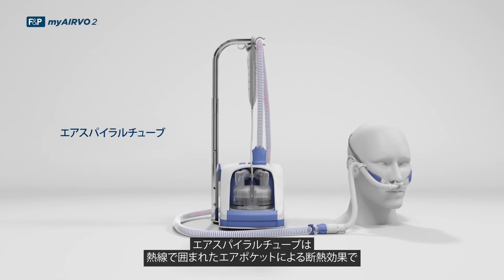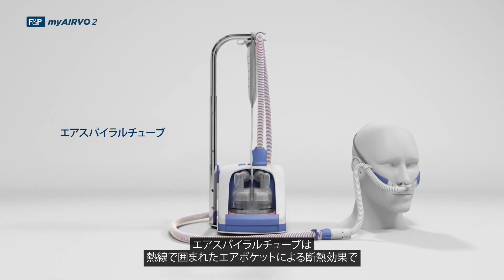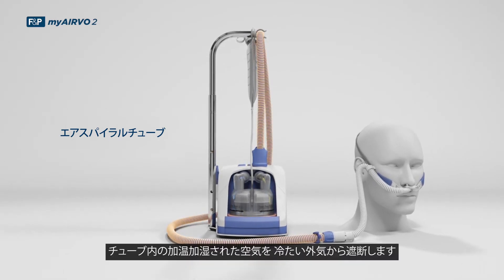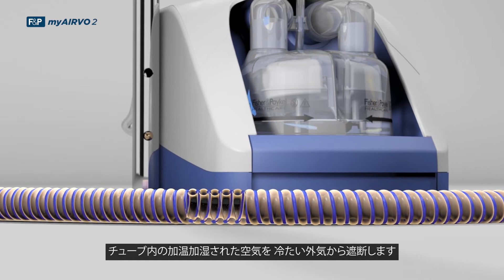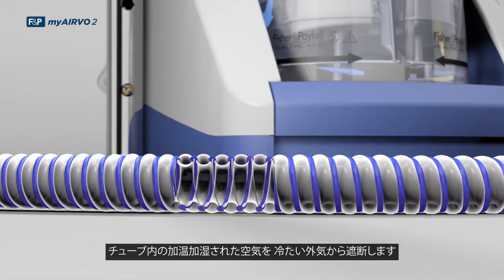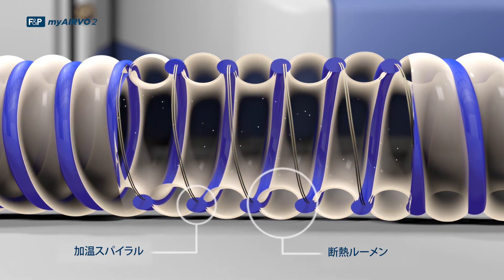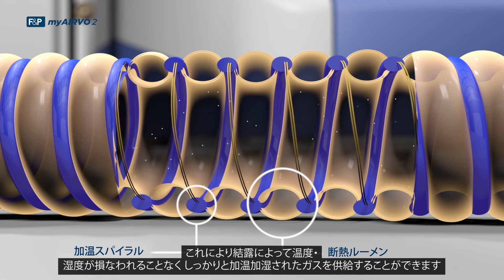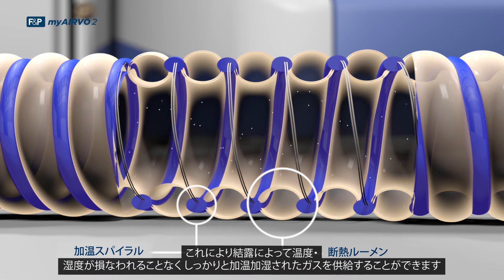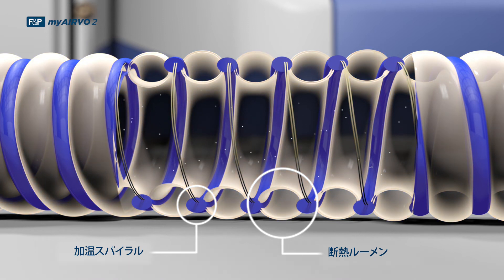The air spiral tube ensures the humidified air is protected from the cold outside environment with insulated pockets of air surrounded by heating wires. This ensures the gas reaches the patient without losing humidity to condensation.